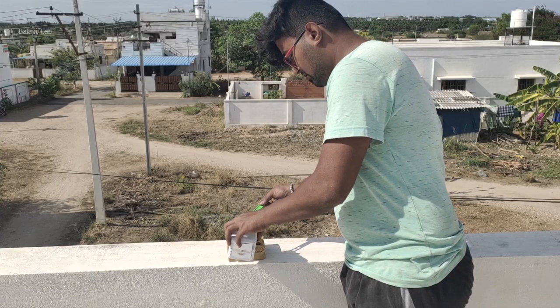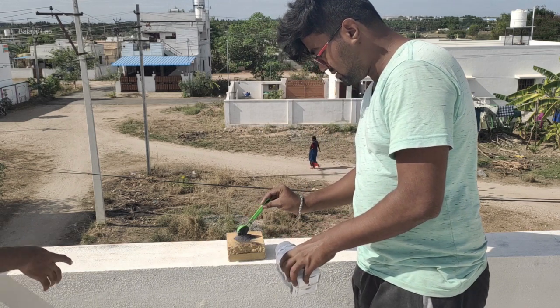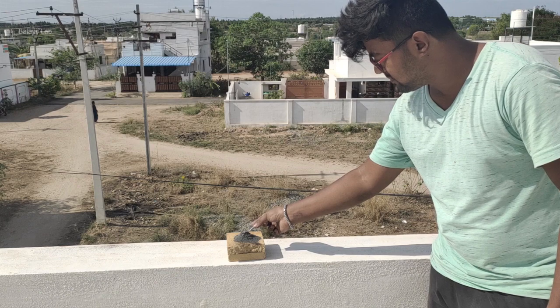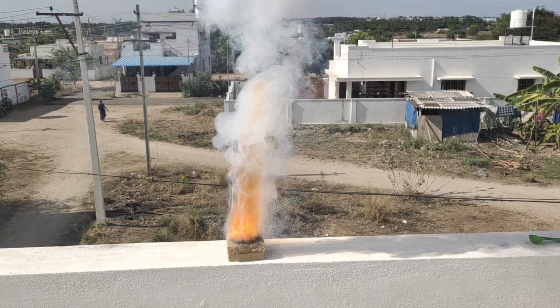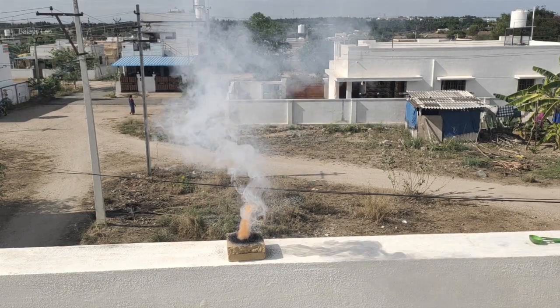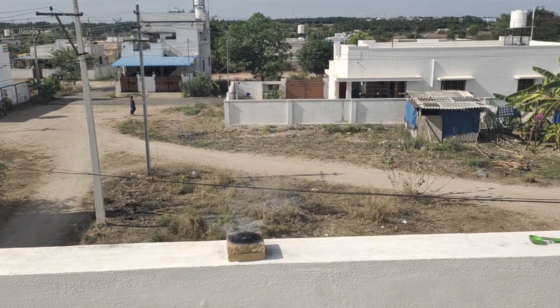It's testing time. I'm going to use a well-ventilated area — it's very safe. I expected some smoke, and that's what I expected. There is some residue left. What is that residue called? Unburnt potassium nitrate.